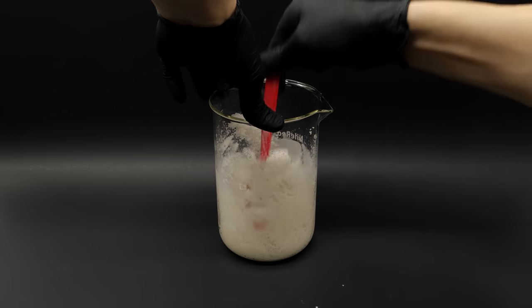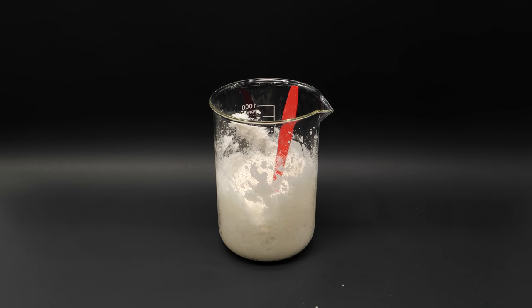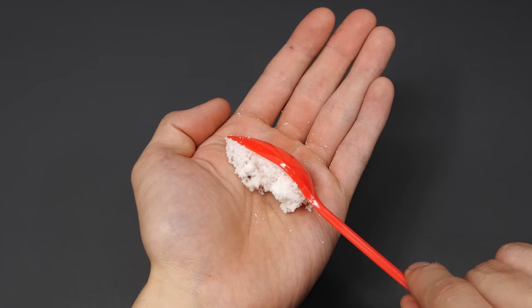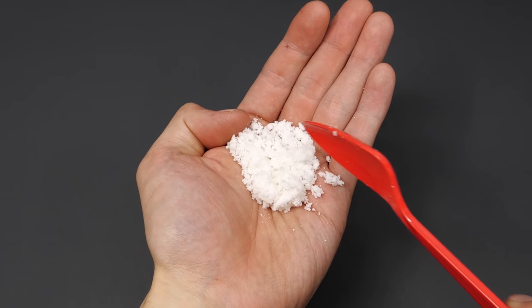After stirring it around for about a minute, I'm left with a fluffy, kind of wet powder. I think that it actually looks a bit like snow, but it's way more dangerous.